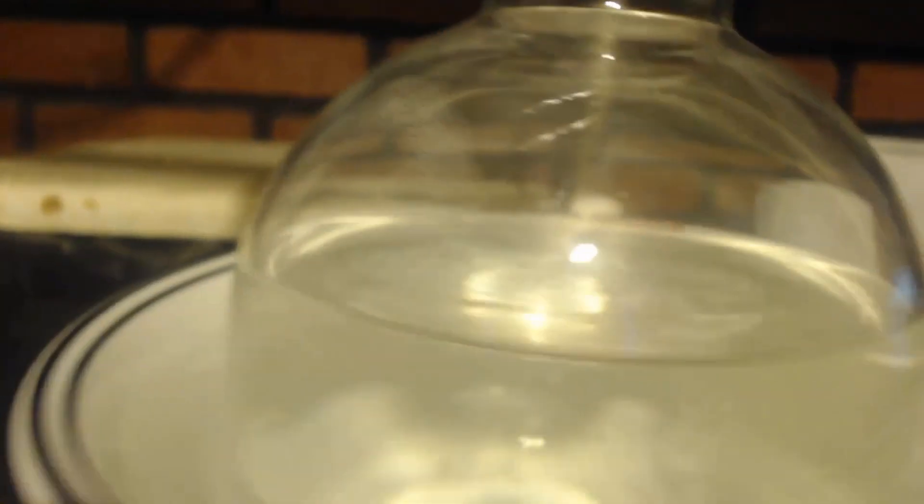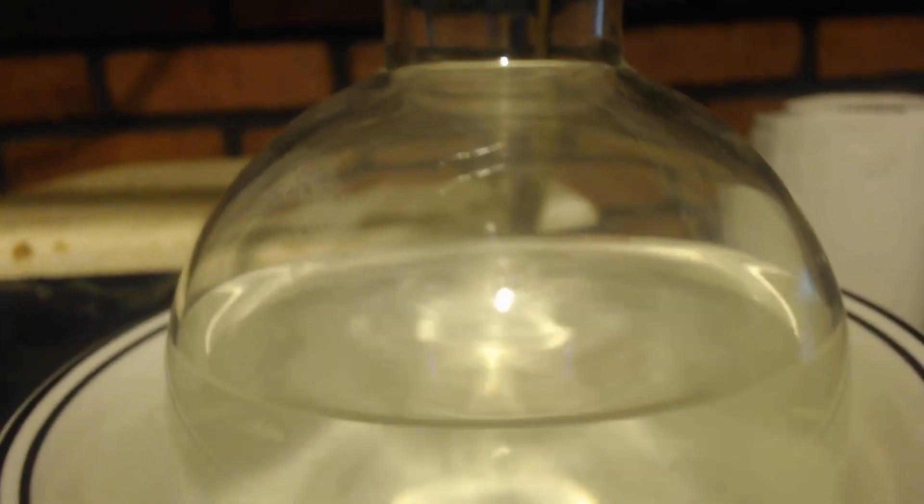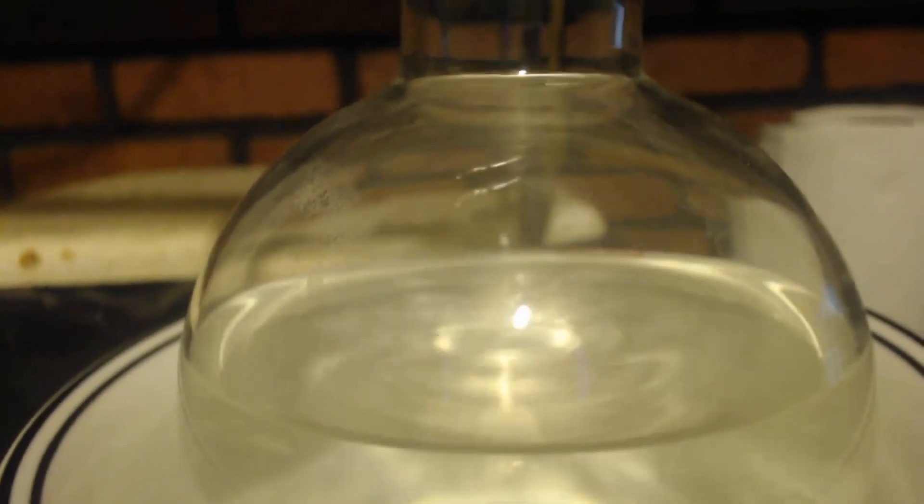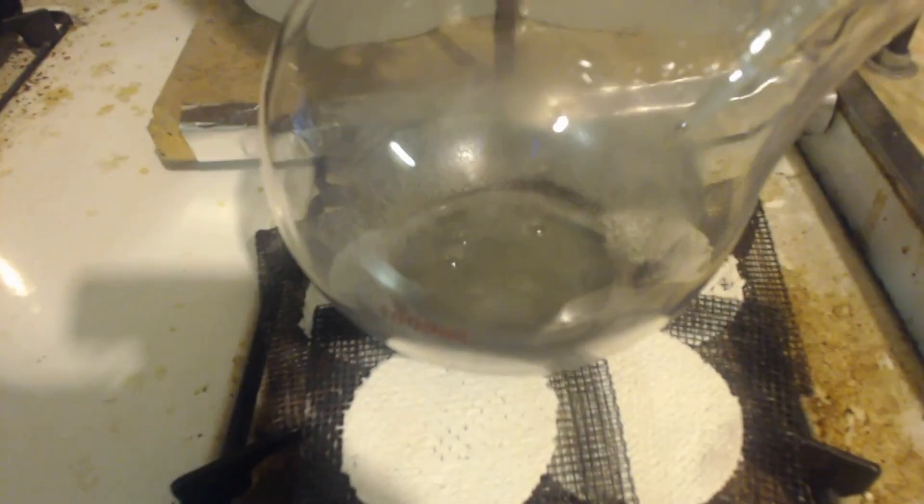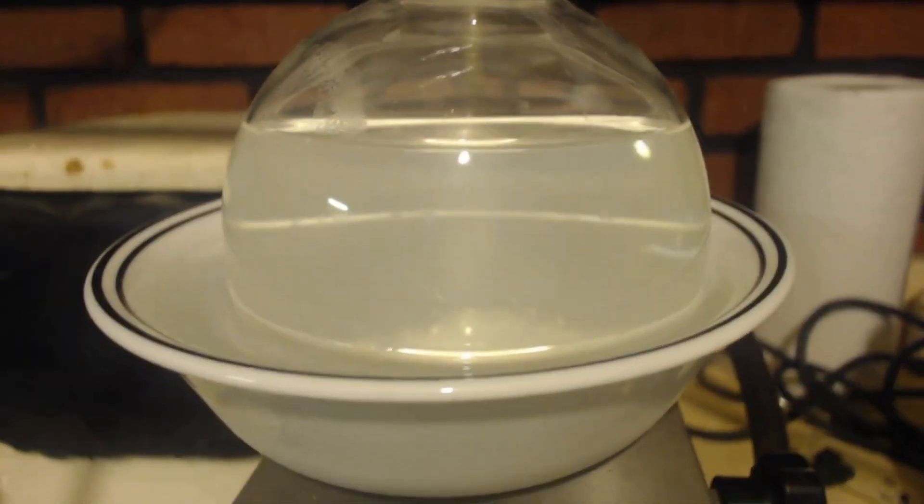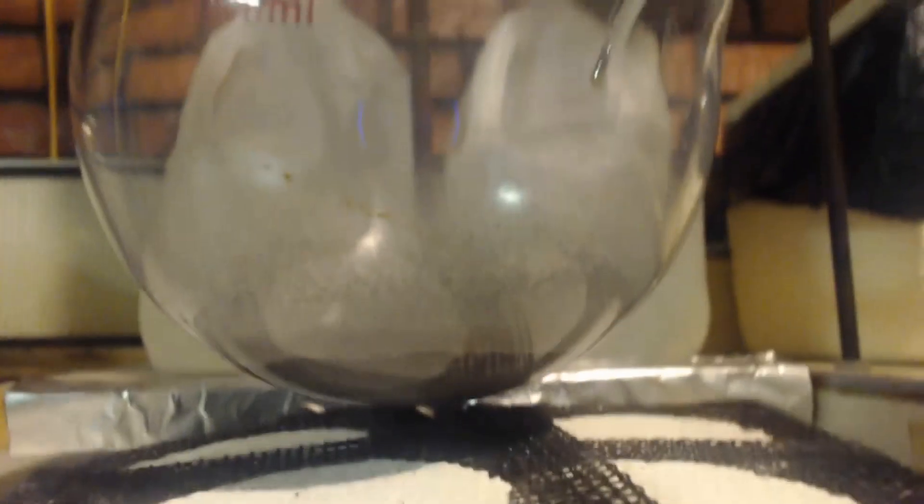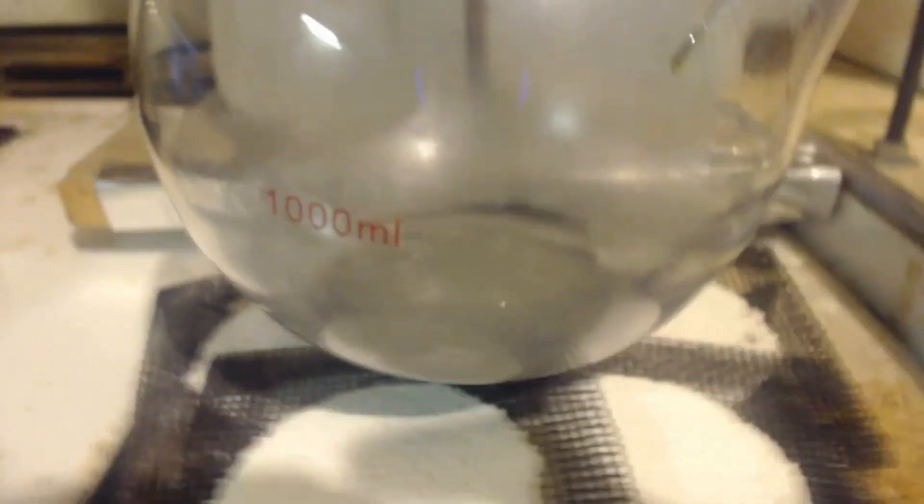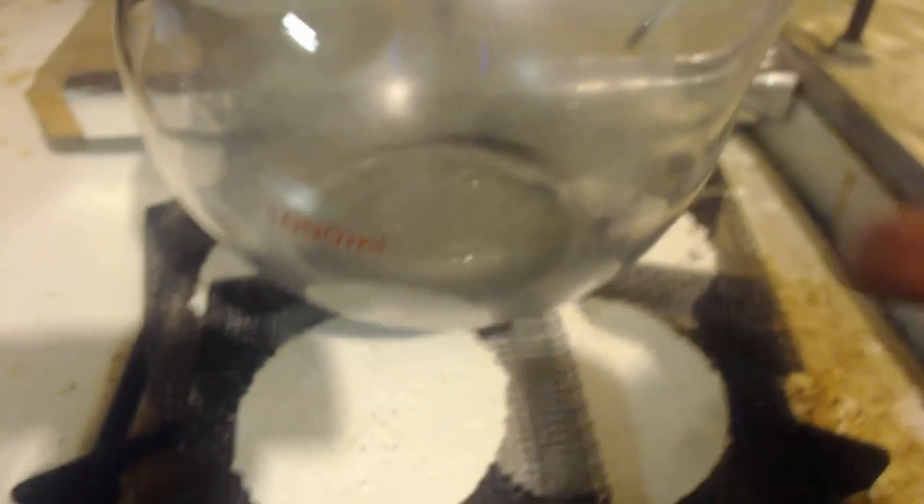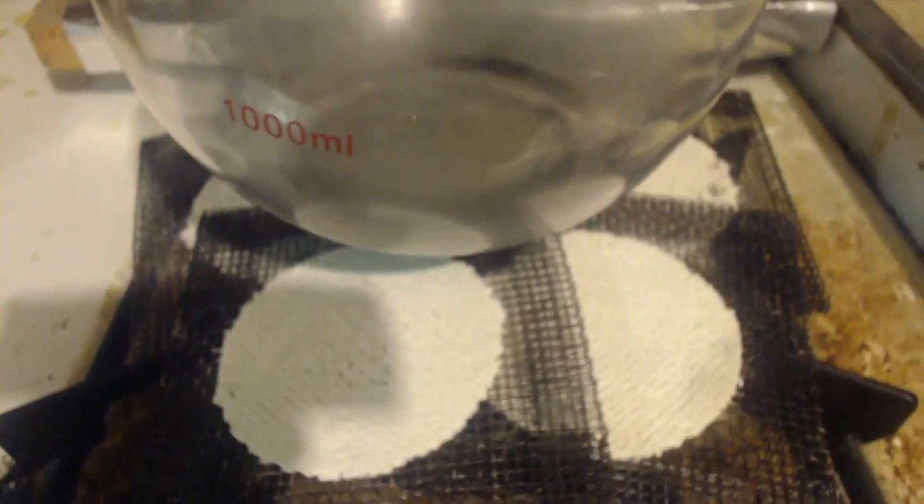You can see it clumped at the bottom now. So, as soon as when I can't keep it at 35 degrees anymore, I'll get back with you. Well, there's barely anything in there. That's the receiving flask. There's the pot. You can see there's barely anything in there. That is a 1,000 milliliter round bottom flask. So even a little bit at the bottom is going to be something.